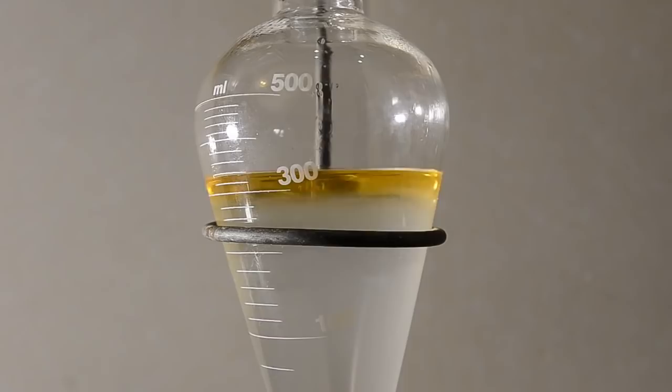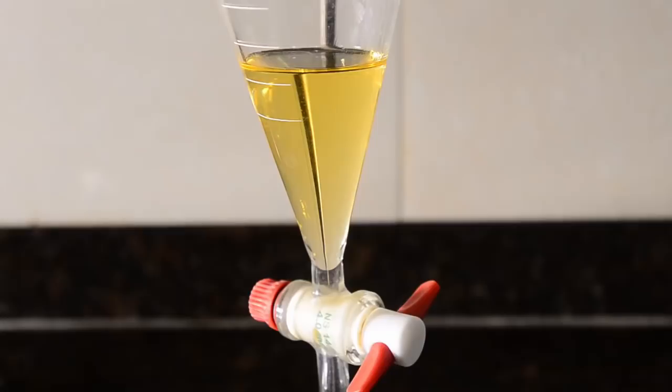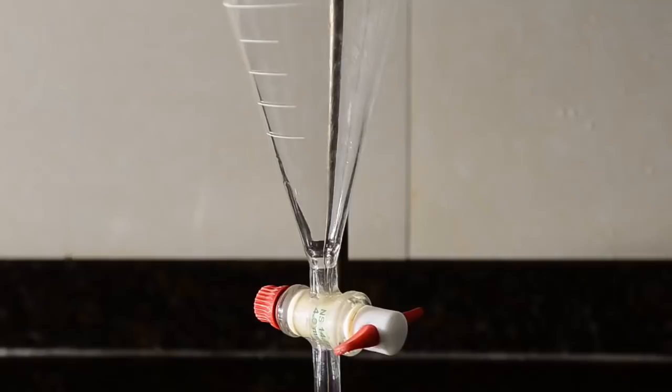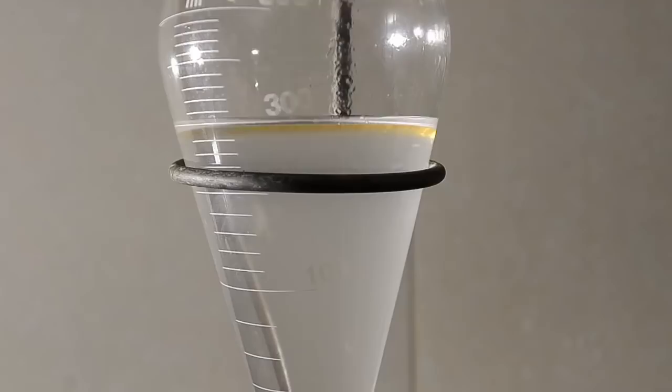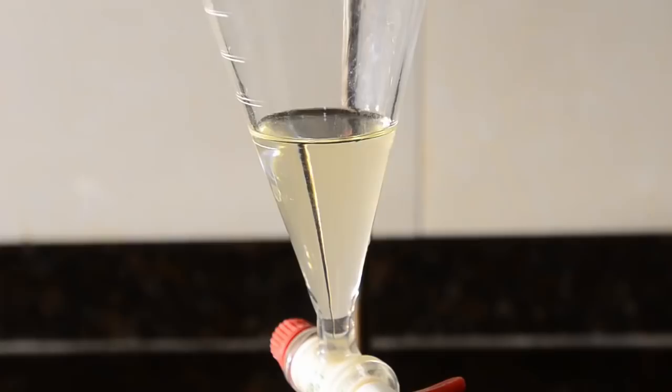Pour this into a separating funnel and separate the bottom aqueous layer. Reserve this. Then collect the benzene layer in a small flask. Return the aqueous layer to the funnel and extract it using 10 ml of benzene. Then separate the aqueous layer and combine the benzene layer with the previous one.